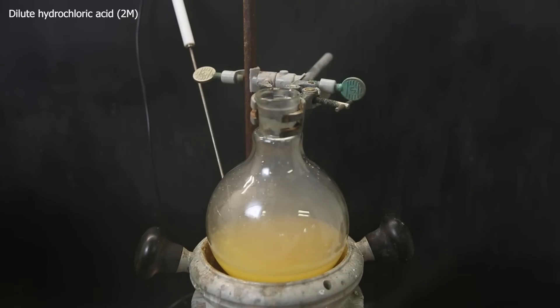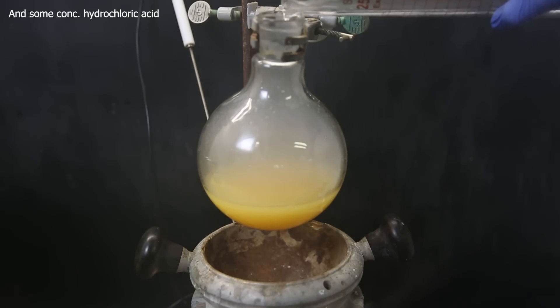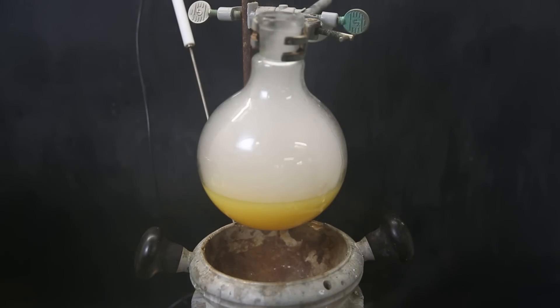The mixture turns yellow, but nothing crystallizes out yet, because a lot of barbiturates are actually very difficult to crystallize out, especially if they contain sulfur. So I set it in the freezer to force it out.